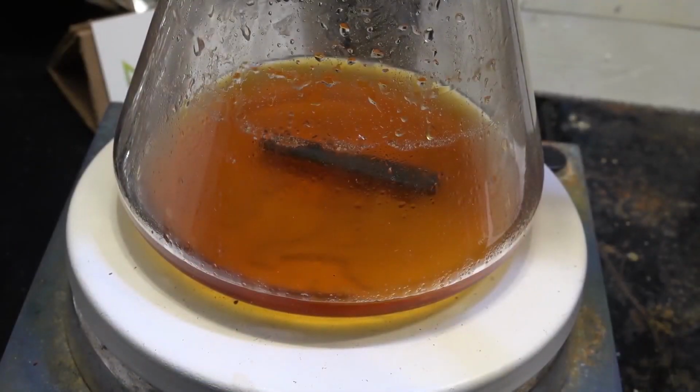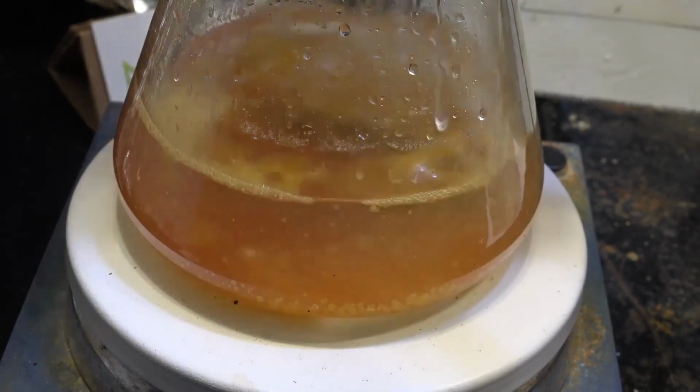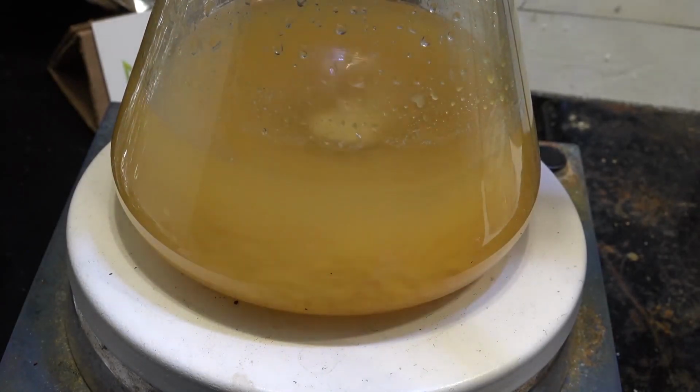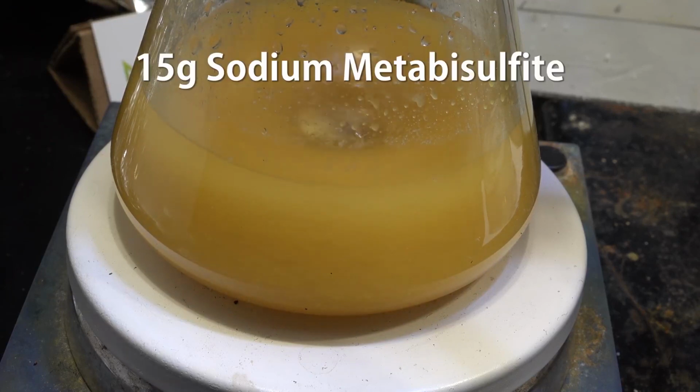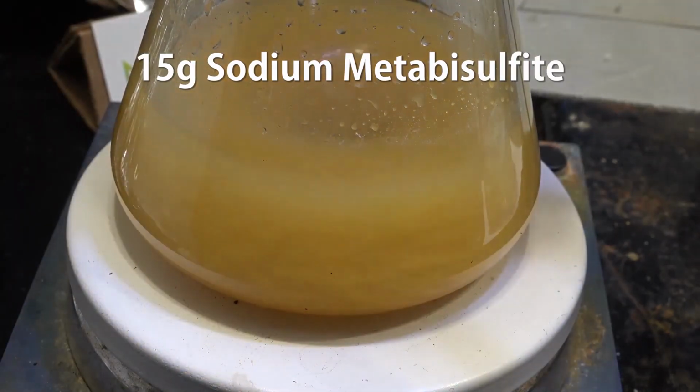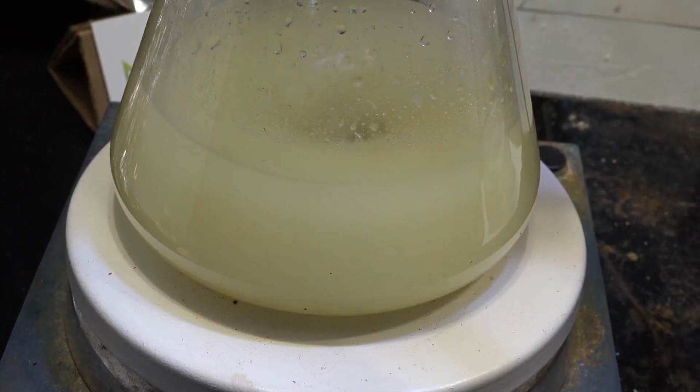And here is our residue containing our product, as well as all the side products and contaminants. Now we need to wash out any water-soluble contaminants. Add in 150 milliliters of water and stir. Now the brown color is from small amounts of triiodide resulting from the oxidation of iodide ions with air. To reduce them, we add in 15 grams of sodium metabisulfite. This dissolves in the water and reduces the triiodide ions into clear iodide ions. This will help us wash them out. Stir the mixture for about half an hour.